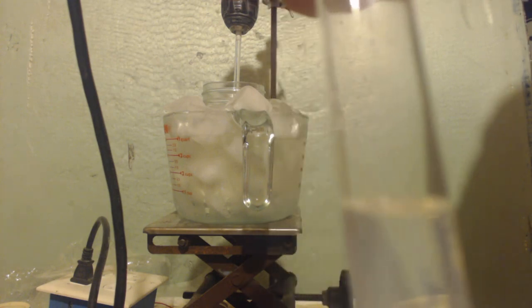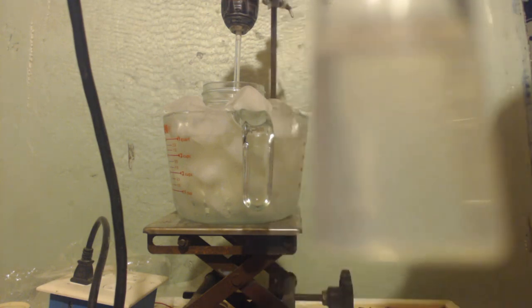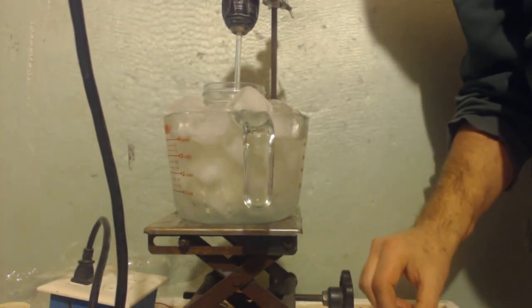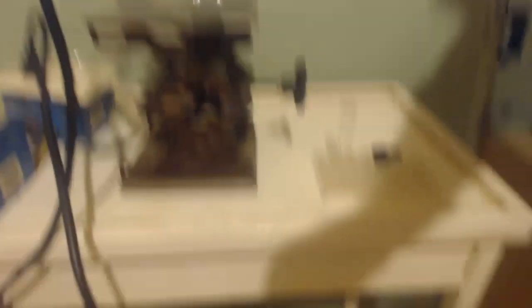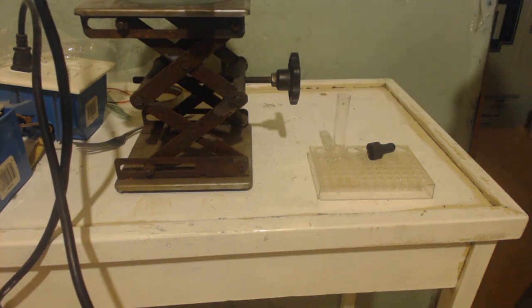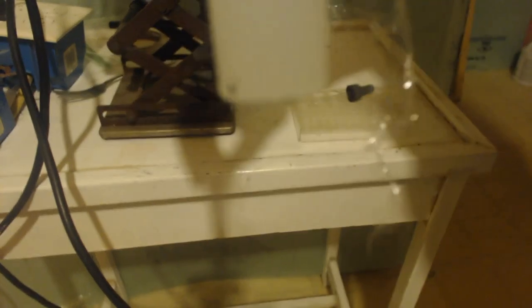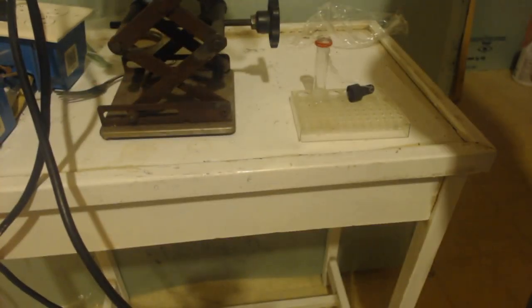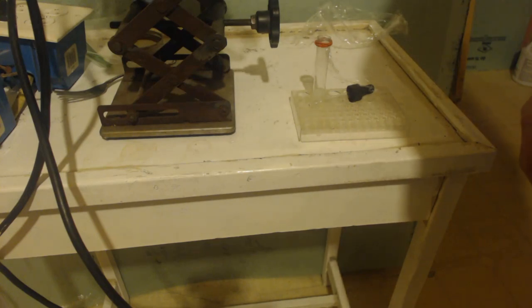Okay, I'm going to have to give this a while to see. Starting to think nothing's precipitating out. I don't know if you can see that good on camera. But there's no particles or anything. I'm going to have to give this like 10 minutes. I'm going to cap it so it doesn't evaporate. It's been five minutes and as you can see, it is totally cloudy. So it is definitely not done. If it was done, the reason why that happened is because there's some kind of ethyl bromide in there. So obviously it's not done, even though it's been about 30 hours of stirring.